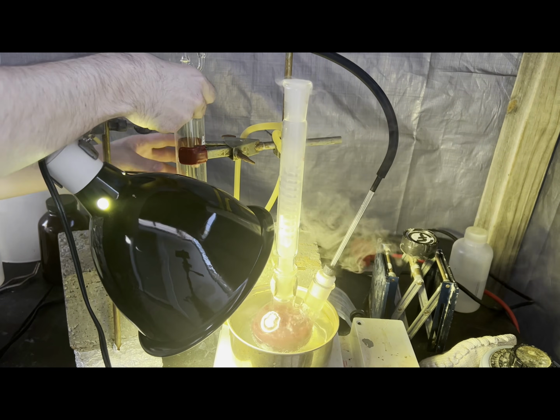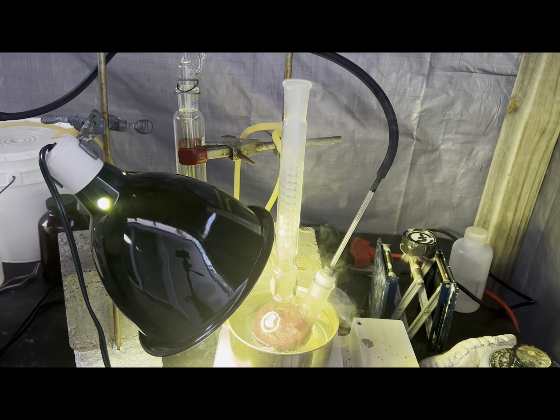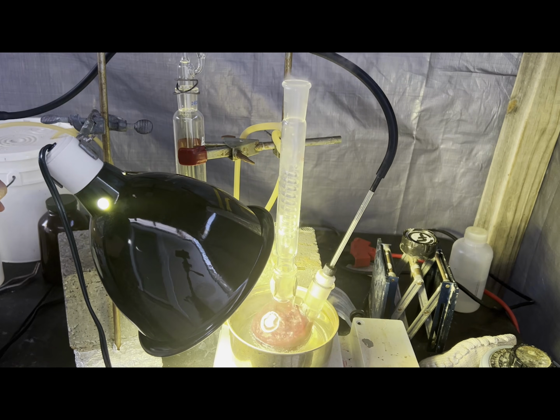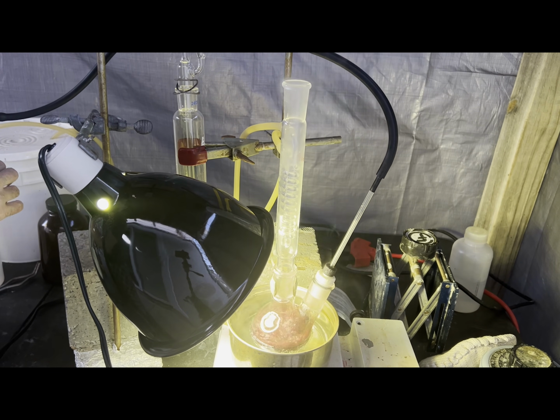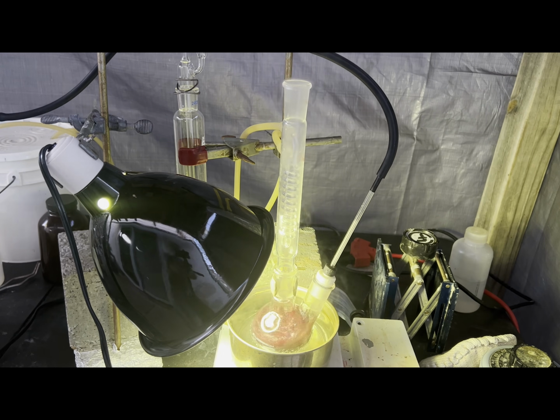The chlorine addition took 2 hours and 15 minutes total, much better than the full day or 2 days of sunlight in the literature value, and I did have to replenish the water a few times. I could smell acetic acid throughout the run of the reaction, which explains something later on.